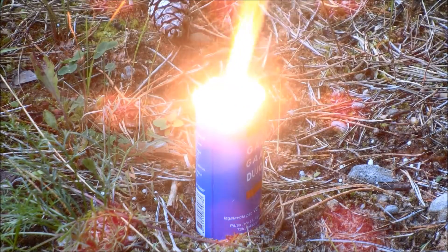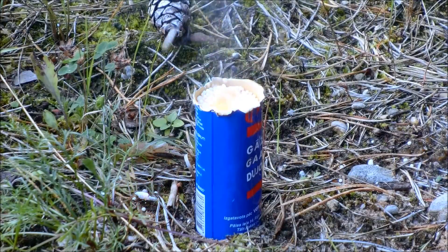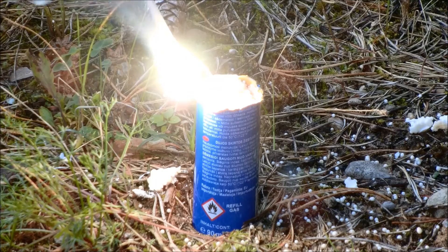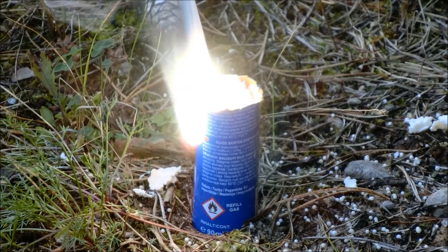It's not really big, but you can see that it produces quite a bit of power. It all stopped when the magnesium ribbon fell out, as you can see.